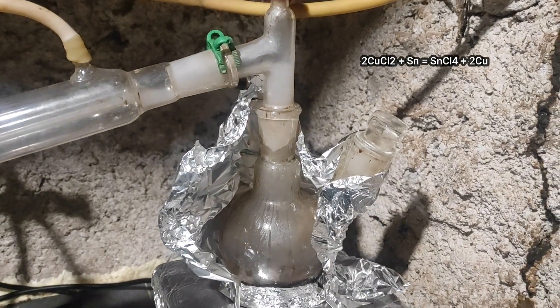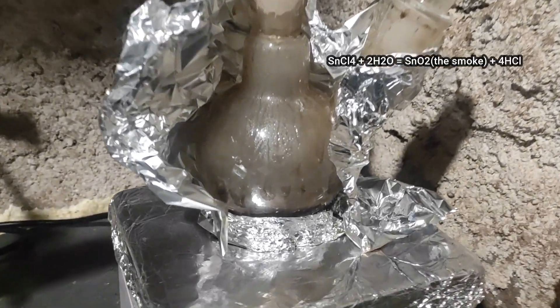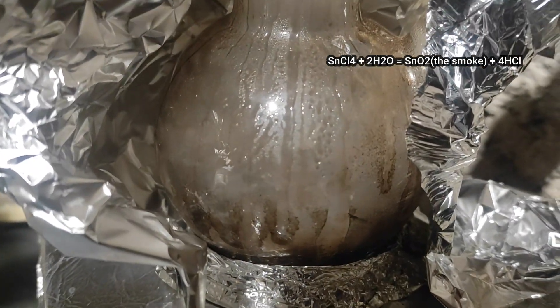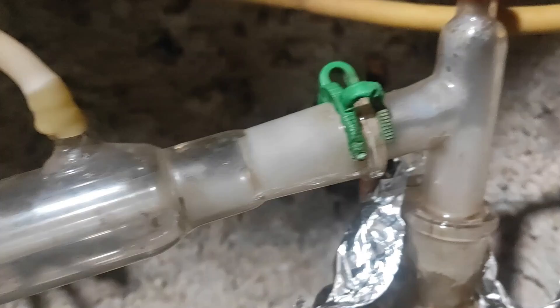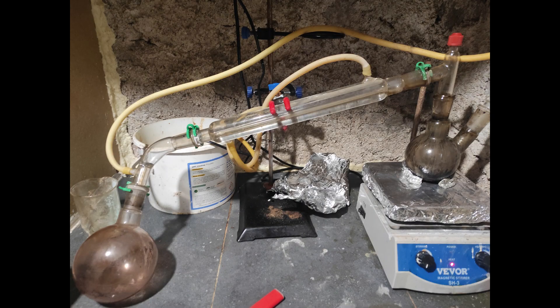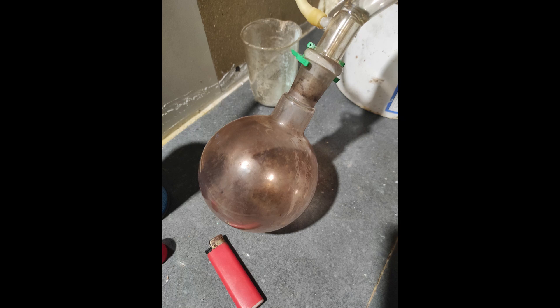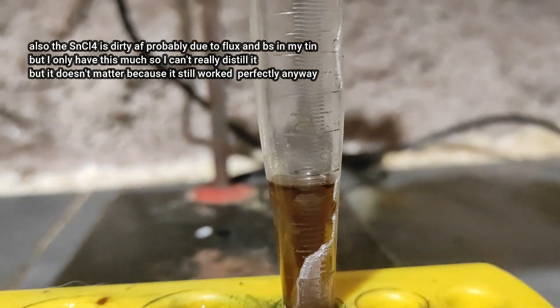After heating, the tin melted and started reacting, stealing the chlorine from the copper to make tin tetrachloride and copper metal. As the tetrachloride is generated, we can observe a white smoke, which is it decomposing into tin dioxide on contact with water vapors from the air. For some reason, the receiving flask turned pink and the two-neck flask turned red, yellow, and black. I think the black is actually an alloy of unreacted tin and copper, but no idea about the rest. Because I didn't cut the tin into small pieces, the yield was pretty bad at 2.5 mL, but it's still enough for what we need.